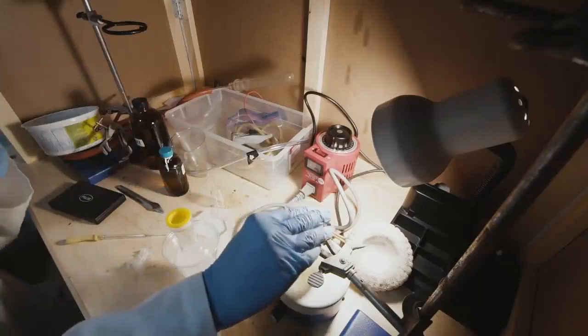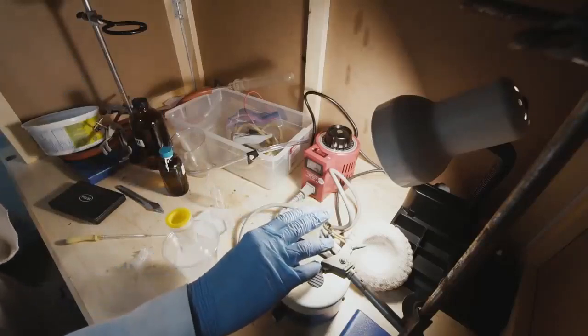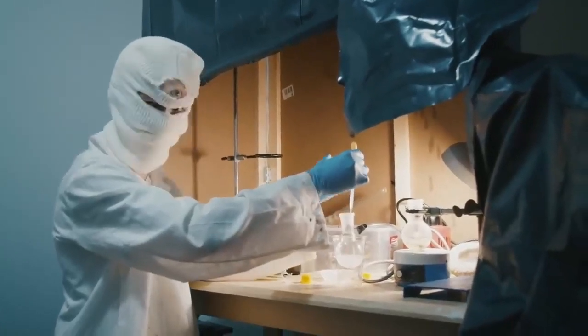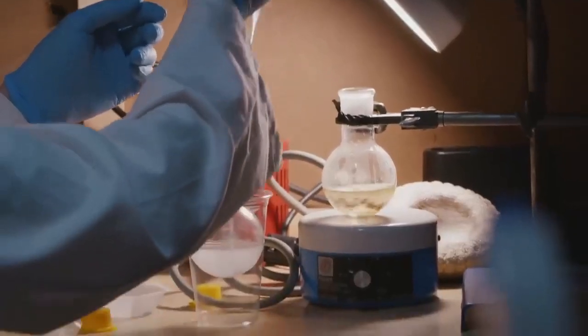Actually, I'm going to give this a little bit to stir. I see silvery, but it's silvery like that. It usually means it's good. That's how I know.